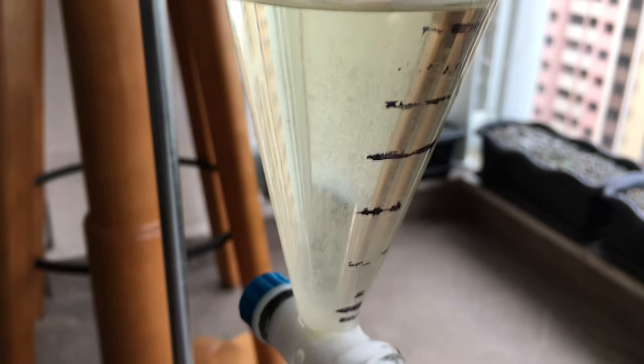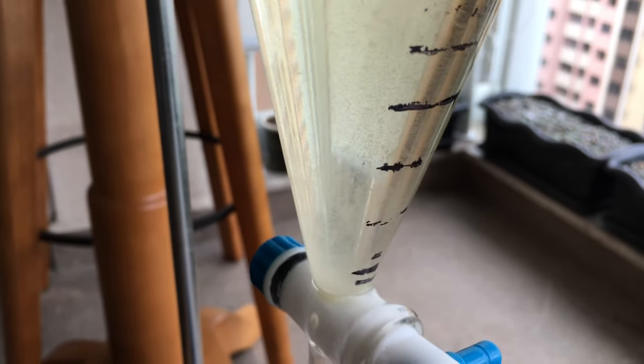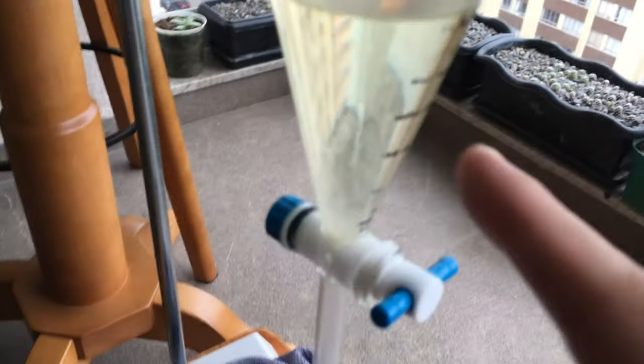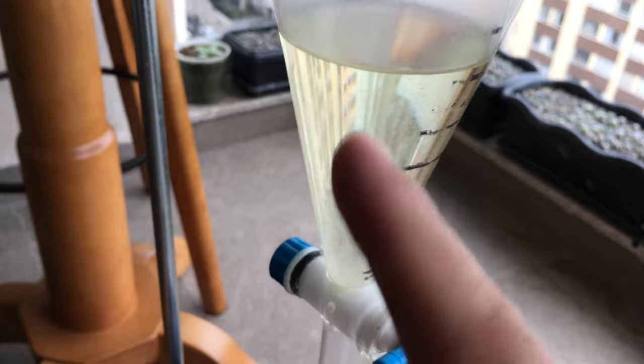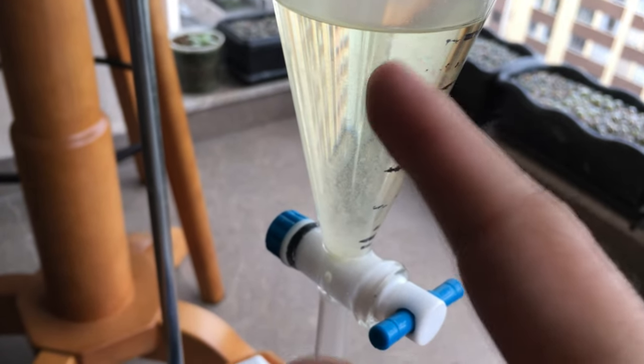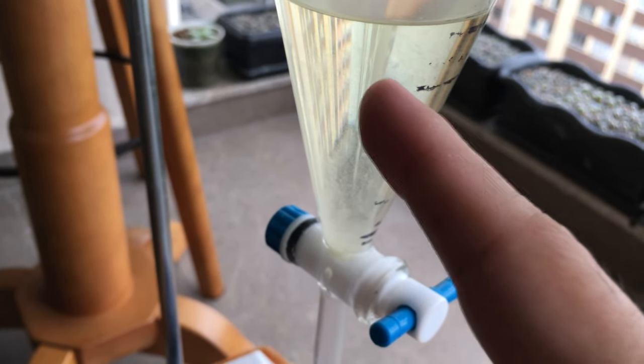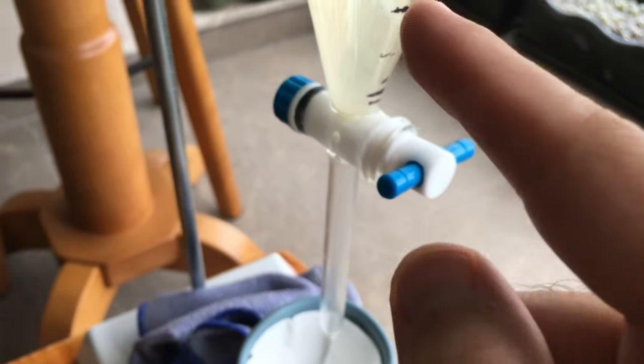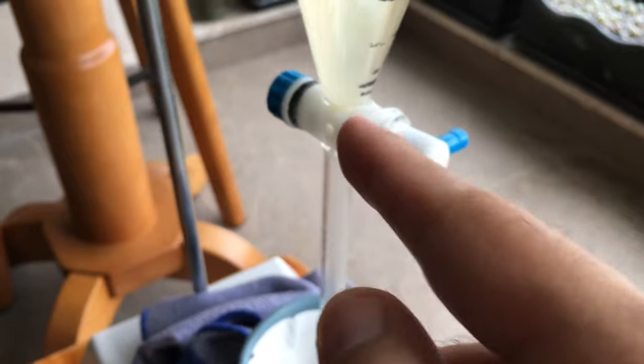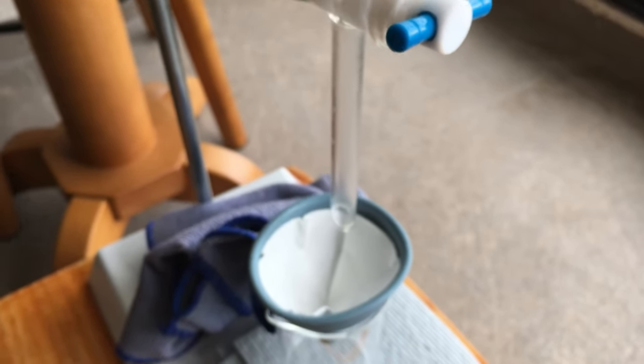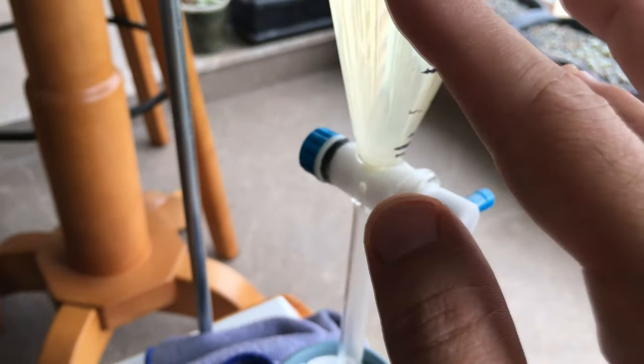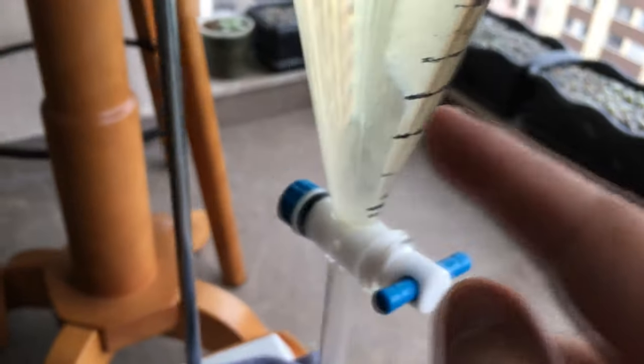There are no salt bubbles with the sodium carbonate. There tends to be some soap bubbles that form and filtering won't fix that issue. You fix the issue of the salt bubbles in the ethyl acetate by rinsing and decanting a few times since the bubbles will stick to the glass. Here it's from a lime water.